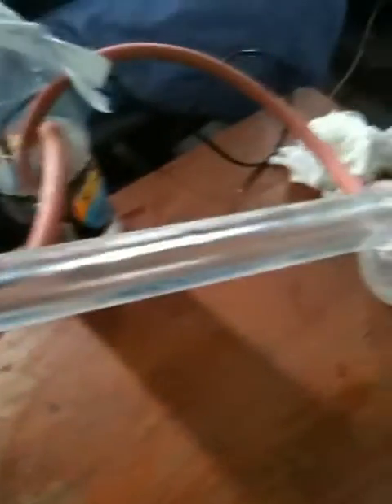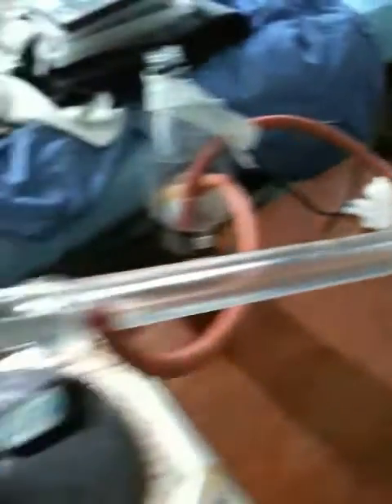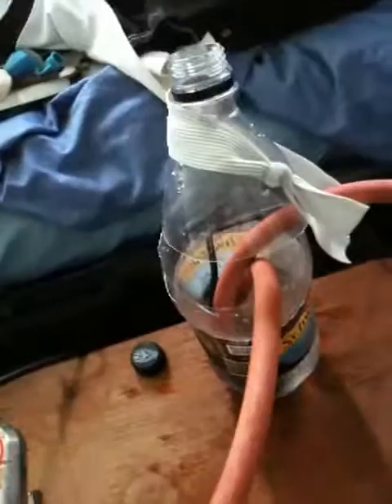As you can see, you can see the condensation on my condenser. I've got a little bit of ice — I might top that up a bit later, but I'm not too fussed about it. As long as it's about 5 degrees Celsius, it should be fine. And as you can see, it's on a slight tilt at the end — that's just because the receiver band that I got is a really long one.